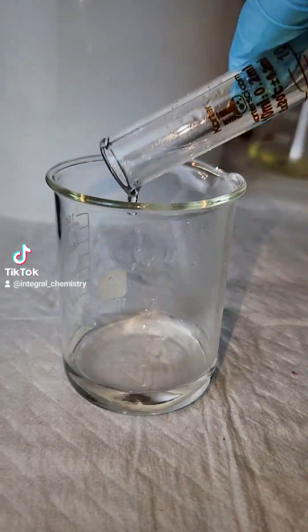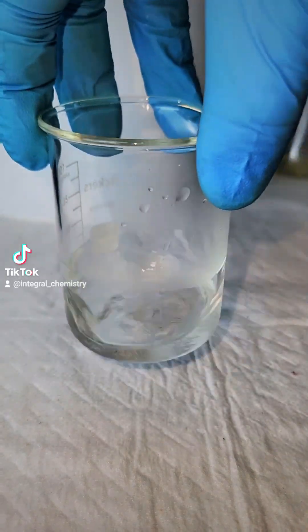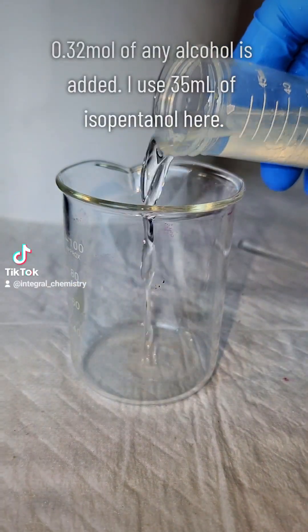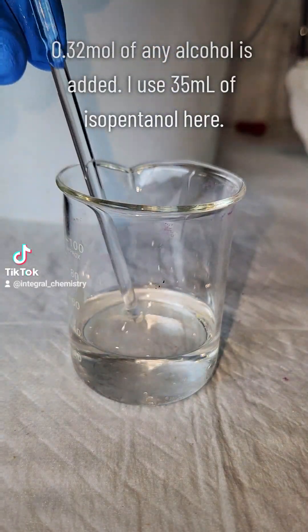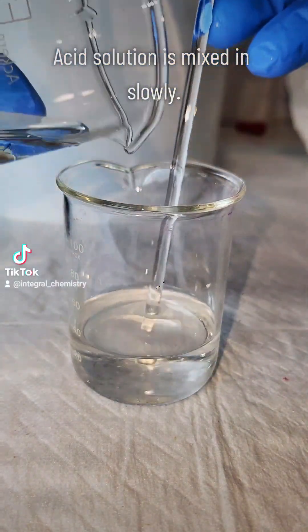As always, be careful when adding sulfuric acid to water as it releases a lot of heat. After my acid mixture is cooled, I want to add it slowly to 0.32 moles of any alcohol.